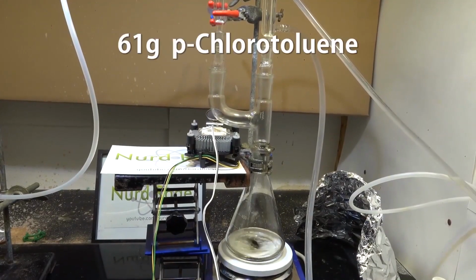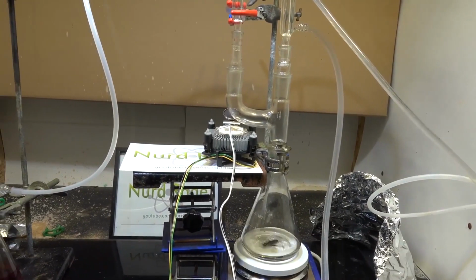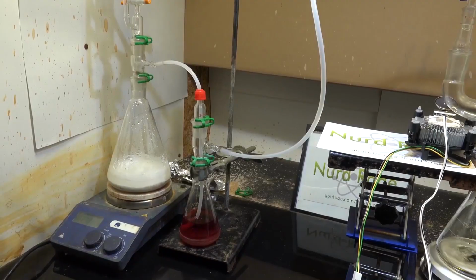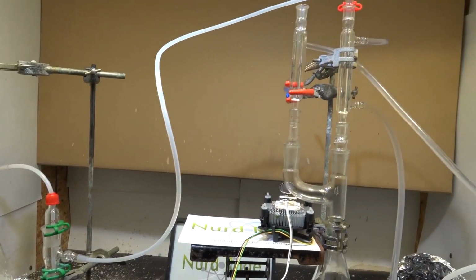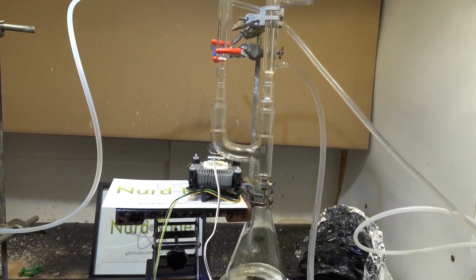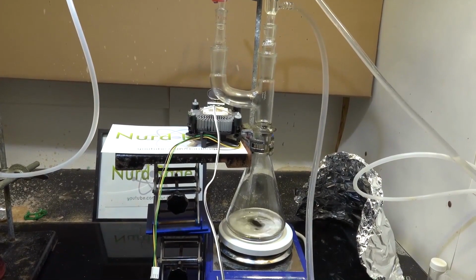First, we have our sample of para-chlorotoluene in the Erlenmeyer flask. We're going to boil that until it refluxes. Now, over here is our chlorine generator and drying flask. This generator is loaded with enough chemicals to produce 1 mole equivalent to p-Chlorotoluene of diatomic chlorine gas. Now after the gas is dried by the sulfuric acid, it passes up here and down this condenser column to the Claisen adapter. There it will meet the para-chlorotoluene vapor that's boiling up from the Erlenmeyer flask.